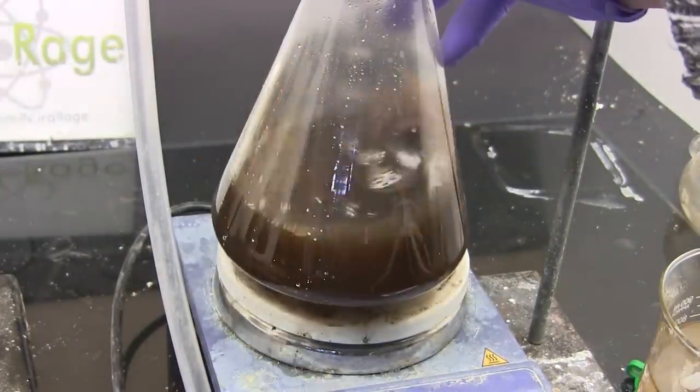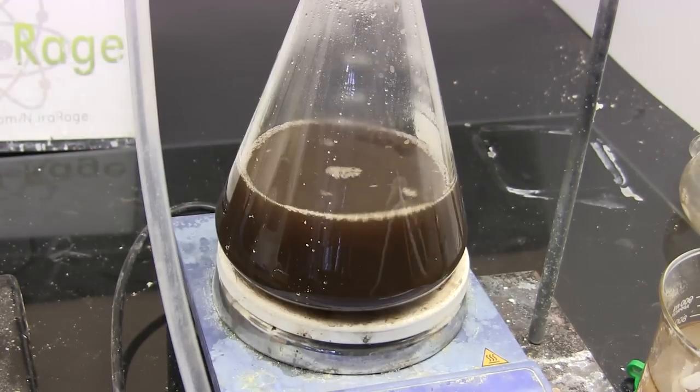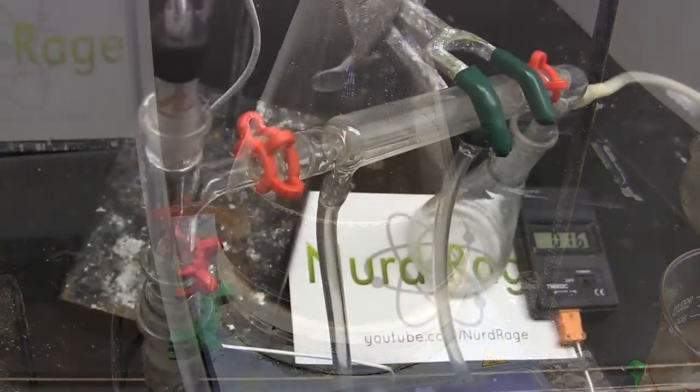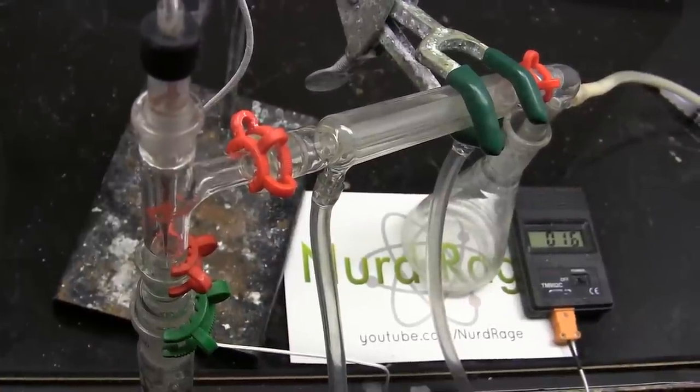And here we are, our washed mixture of crude chlorotoluenes, byproducts and unreacted toluene. To separate it we're going to use our least favorite technique, fractional distillation.